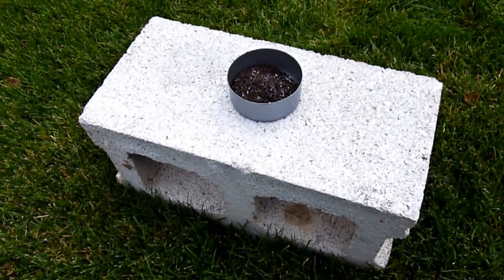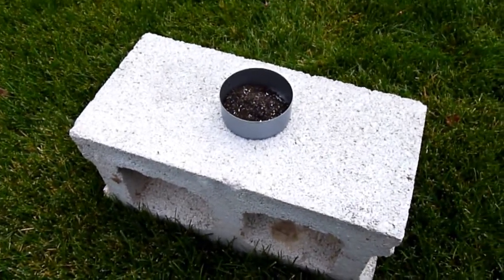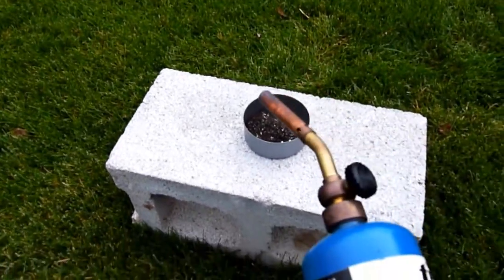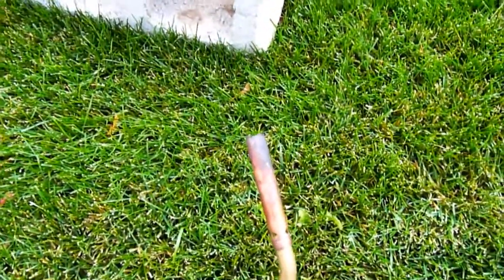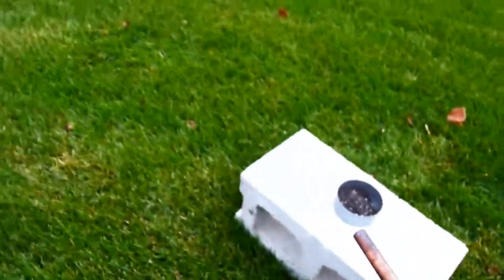Alright, we're outside. We have the thermite mixture in the can and I'm going to light it with this torch. So. Whoops. Alright, here we go.